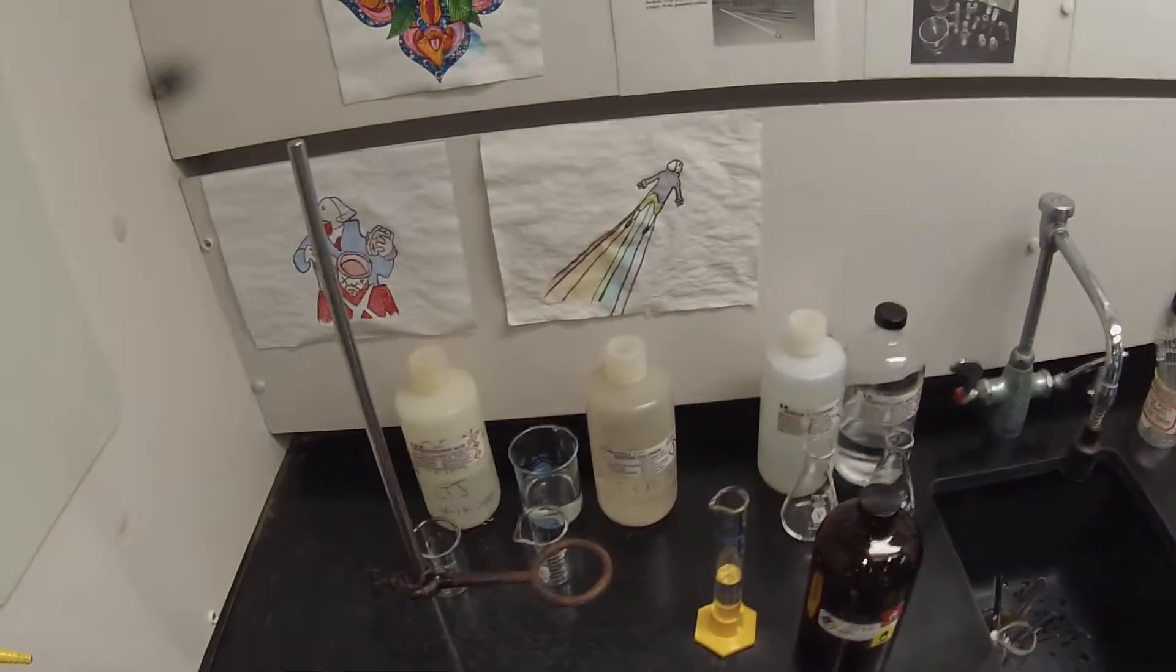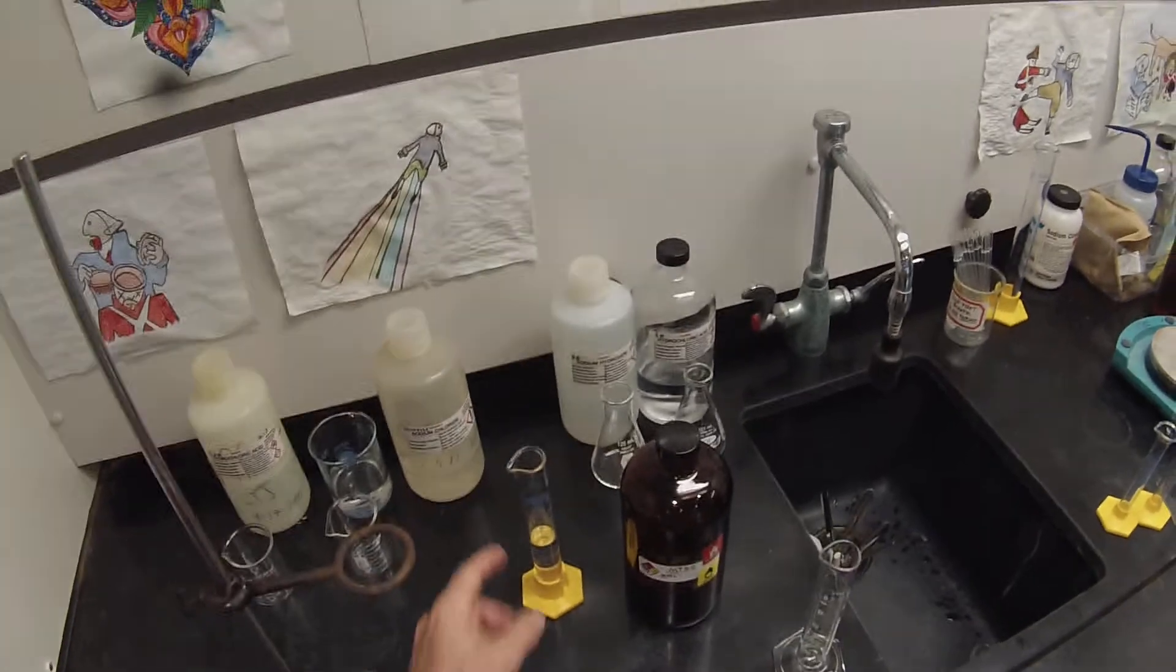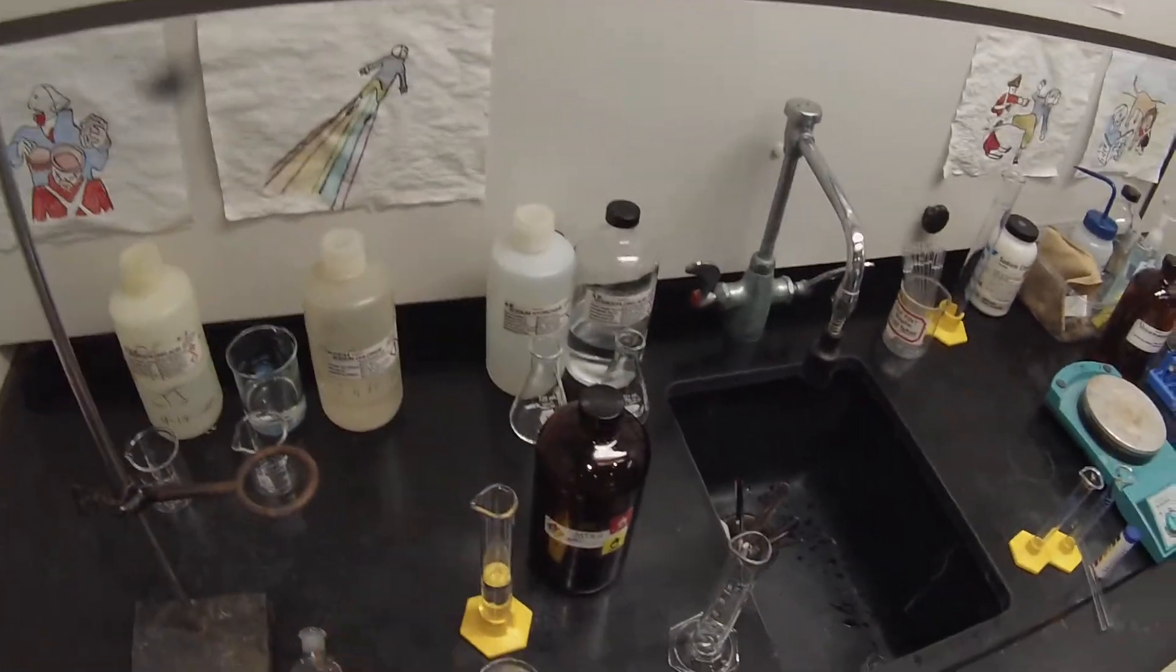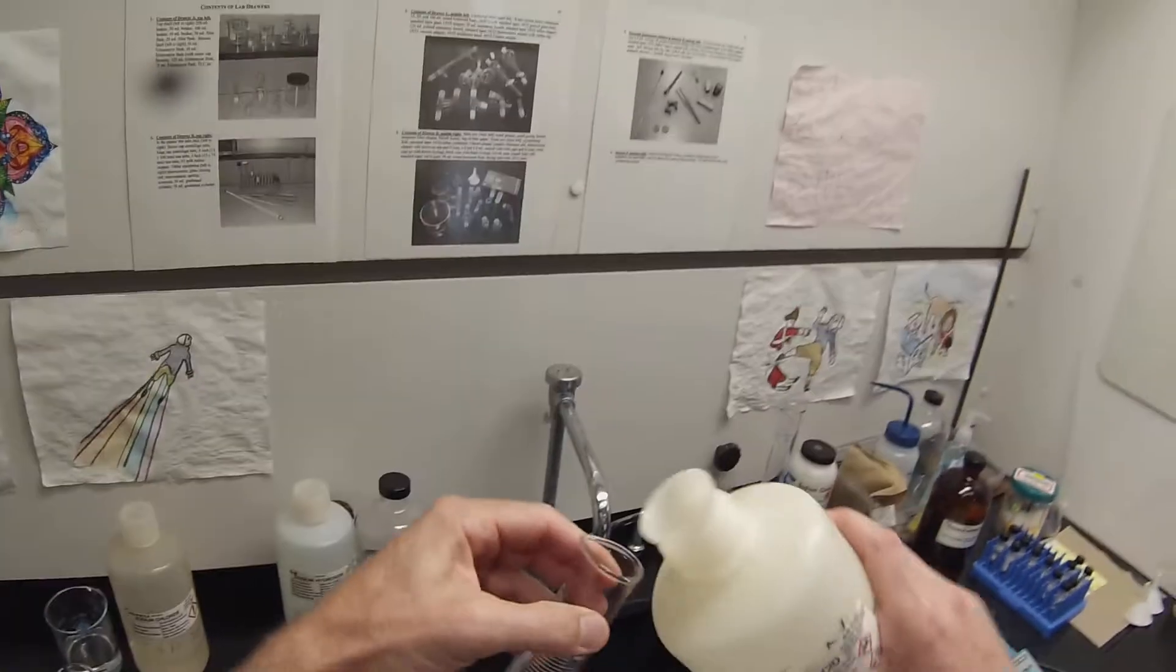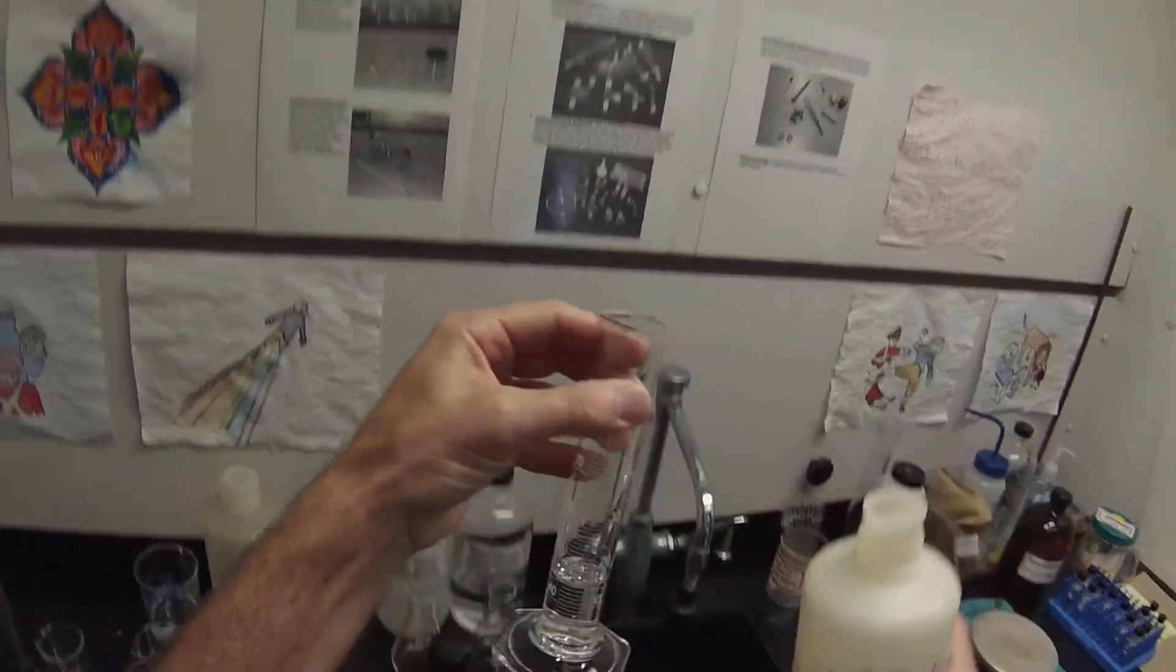Because I'm going to be using a slightly smaller volume of material, I'm going to use 30 milliliters of MTBE and only 15 milliliters at a time of my 0.5 molar hydrochloric acid. I'm actually going to switch to using a smaller separatory funnel as well - a 60 milliliter separatory funnel instead of a 125 should get the job done.